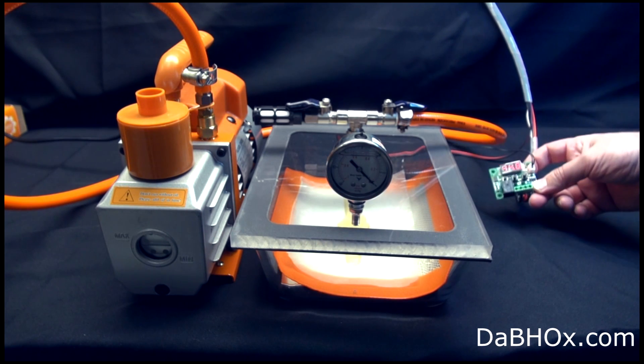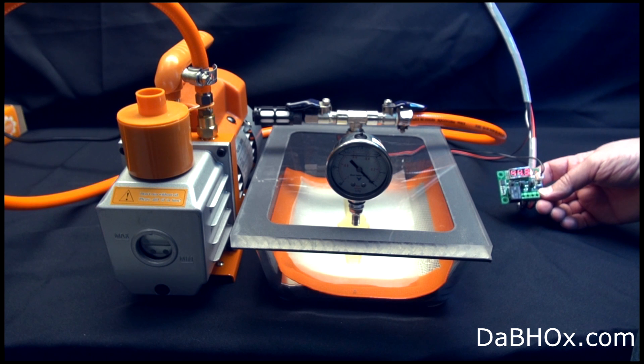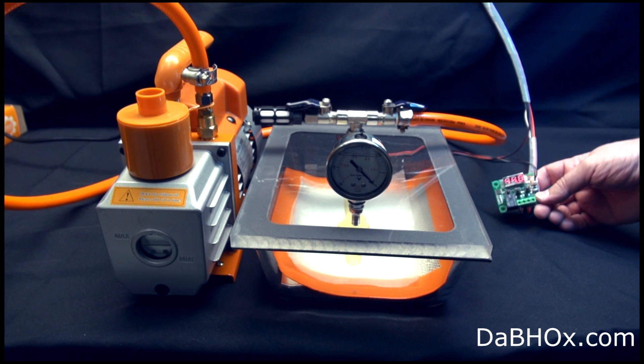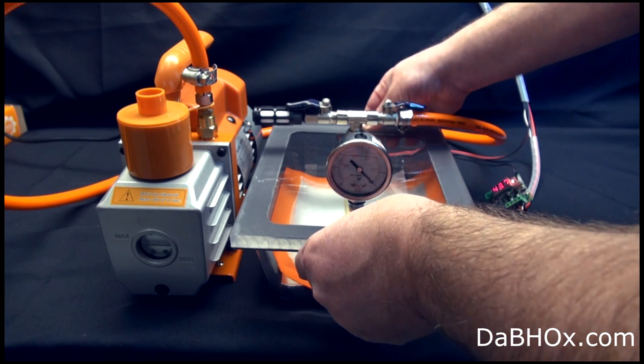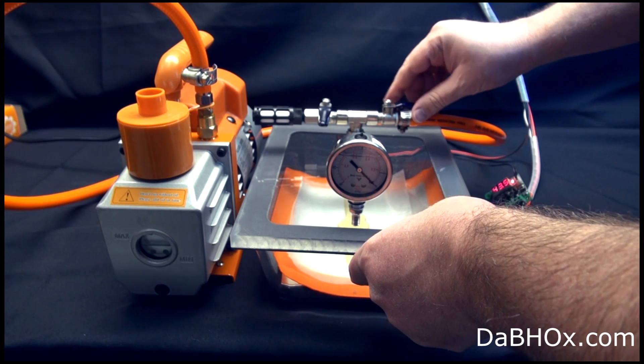Set desired temperature. You're going to have options to either use Celsius for European guys or Fahrenheit for US market. And the unit is actually both 110 and 220 volts compatible. Set desired temperature. Close the air valve. Open the vacuum valve.